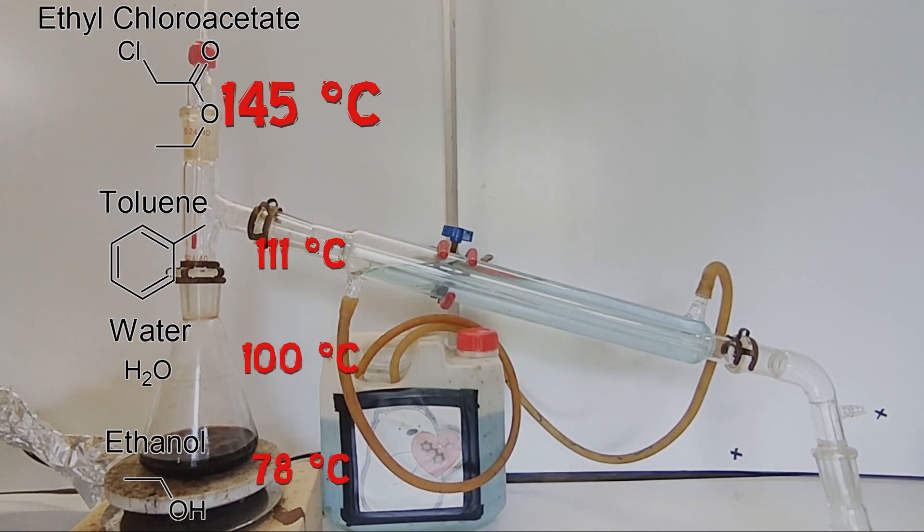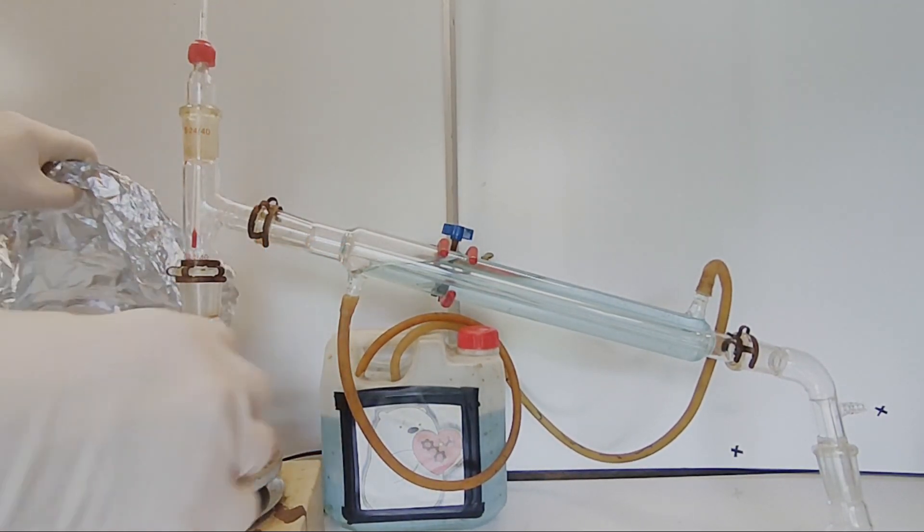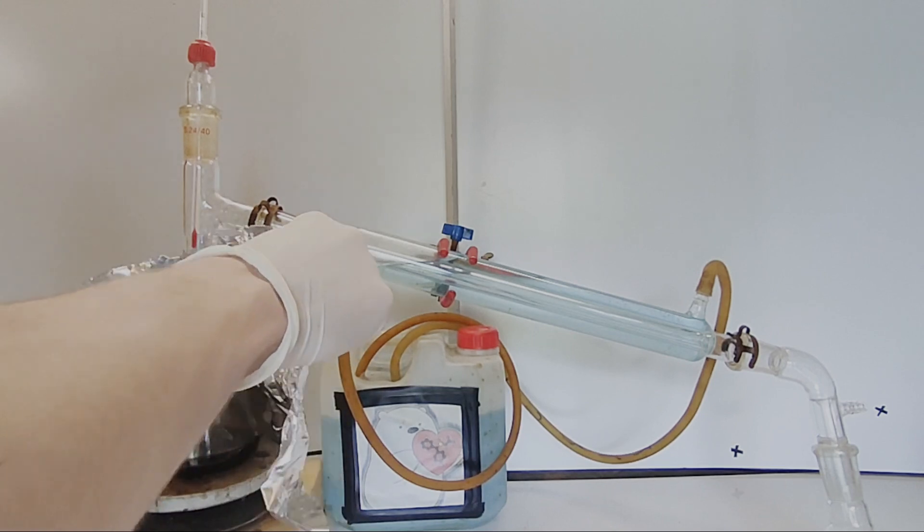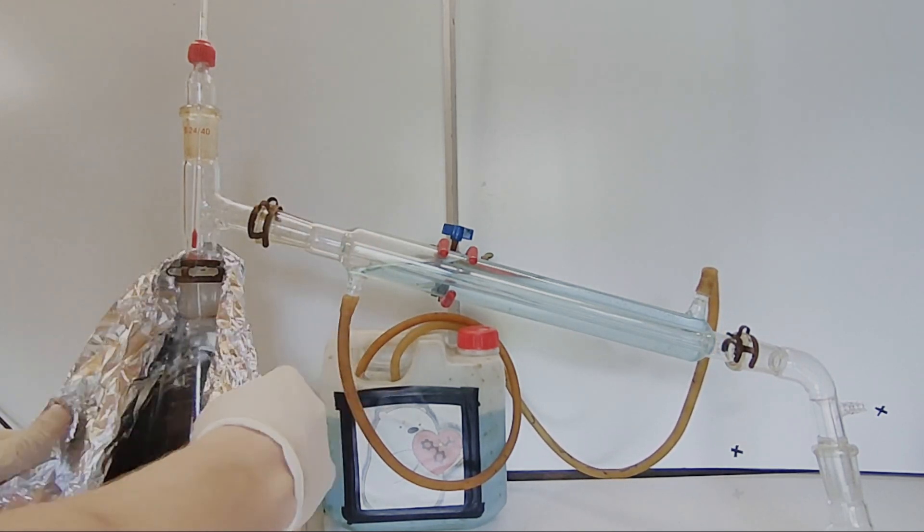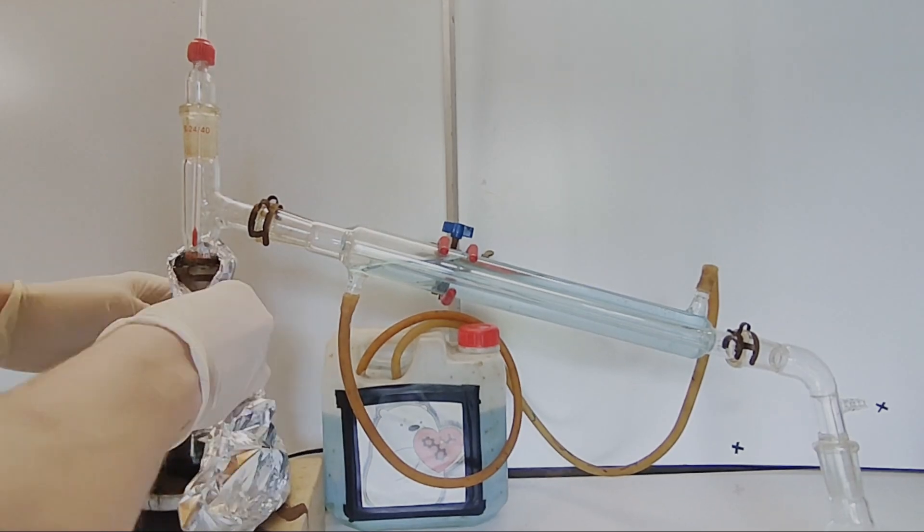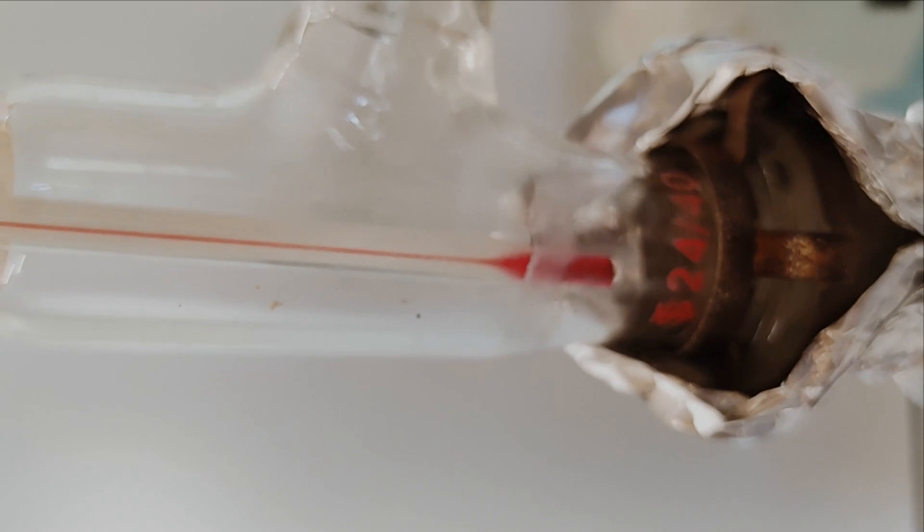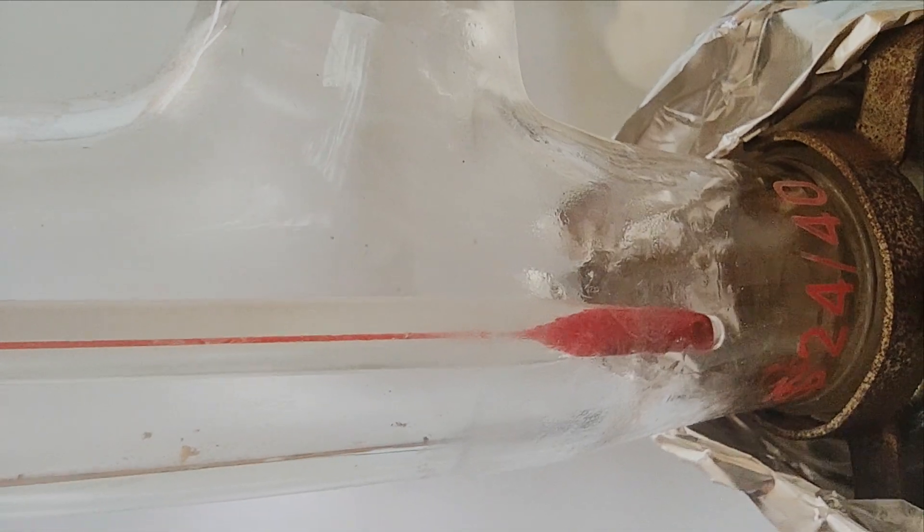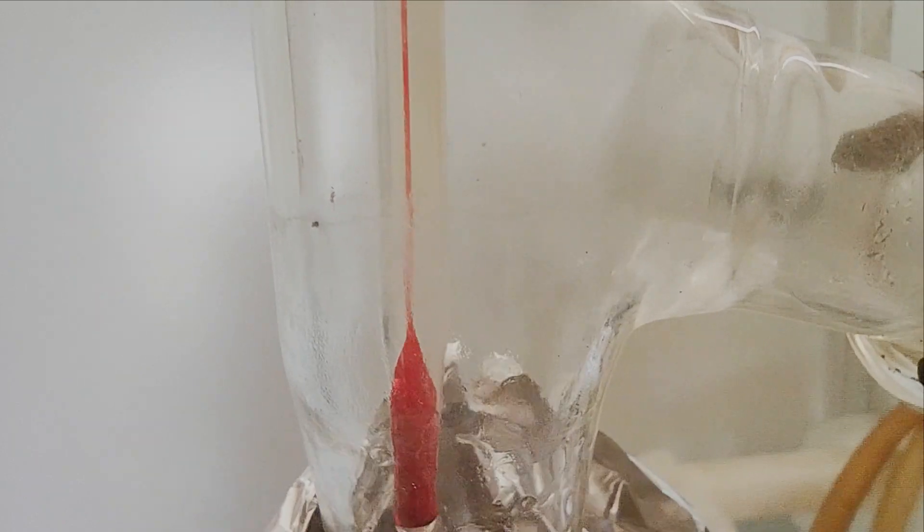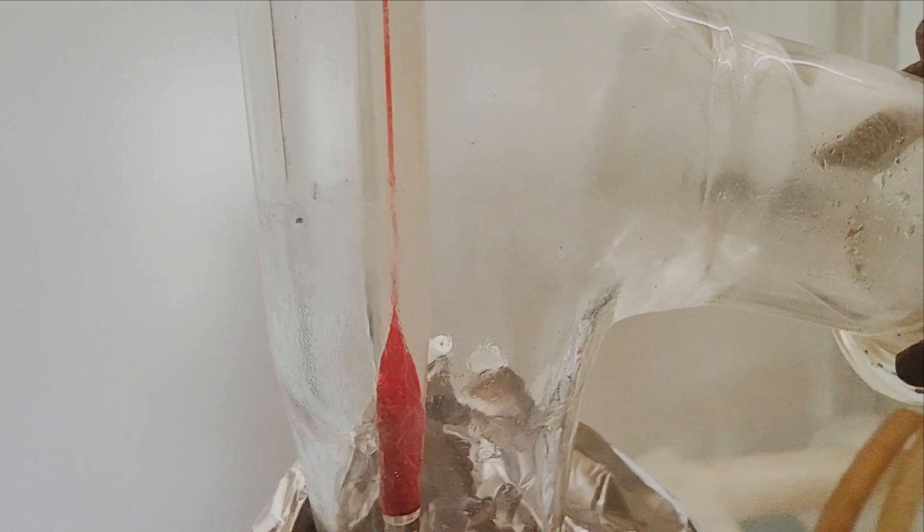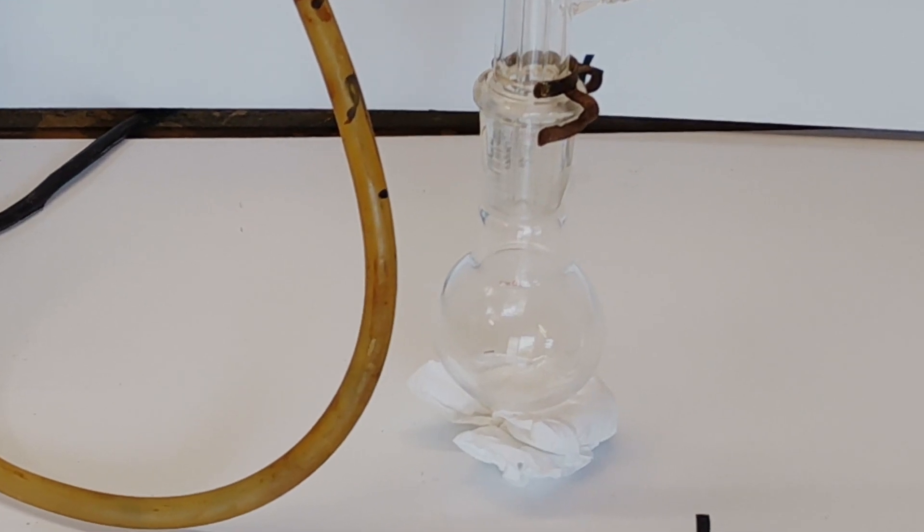Once the ethanol, toluene, and water have been removed, and the distillation temperature reaches 145 degrees Celsius, we can start collecting our product.